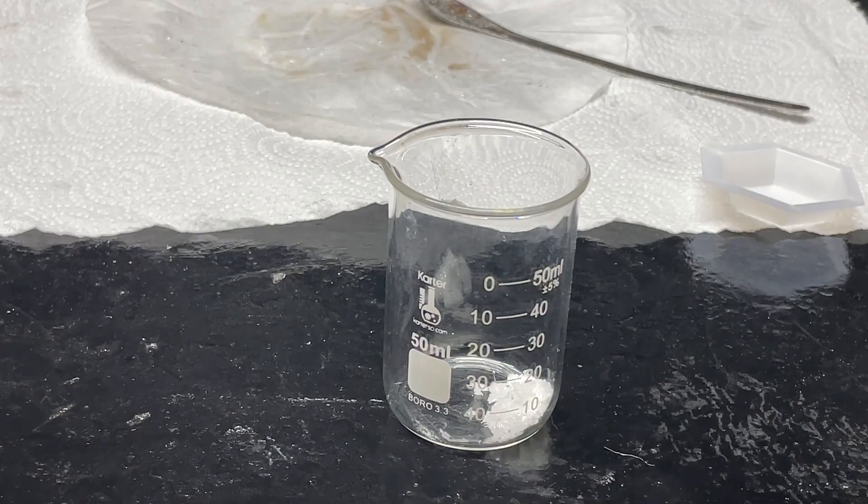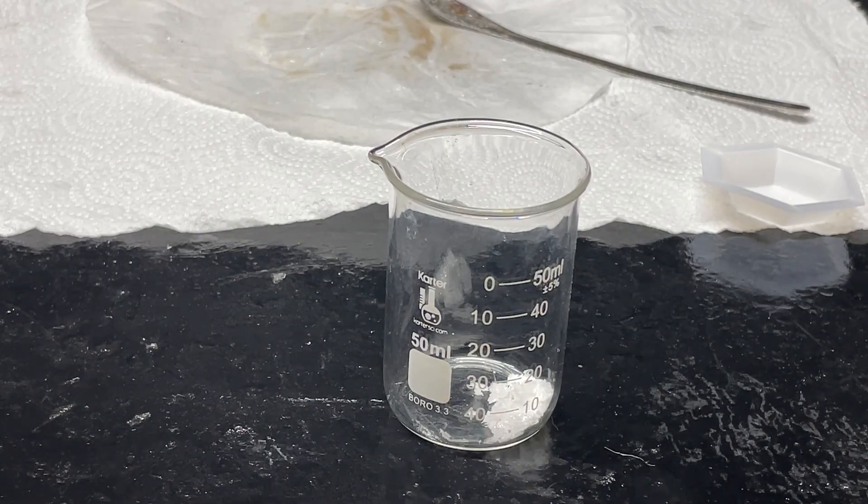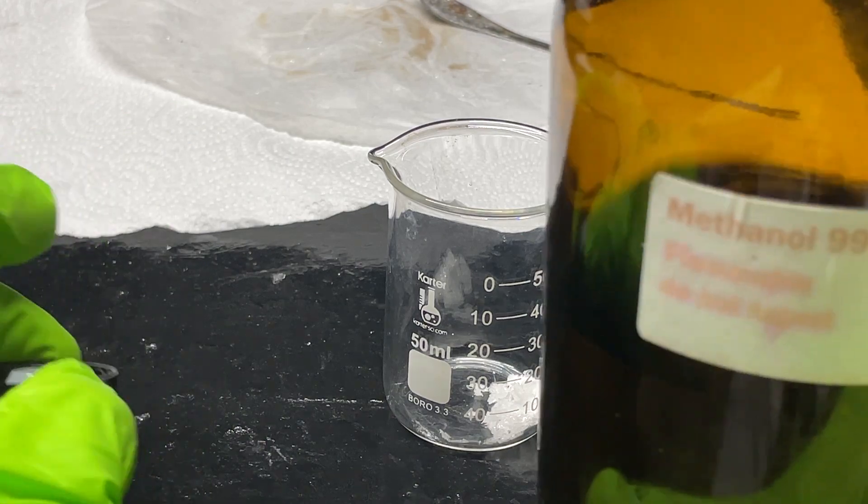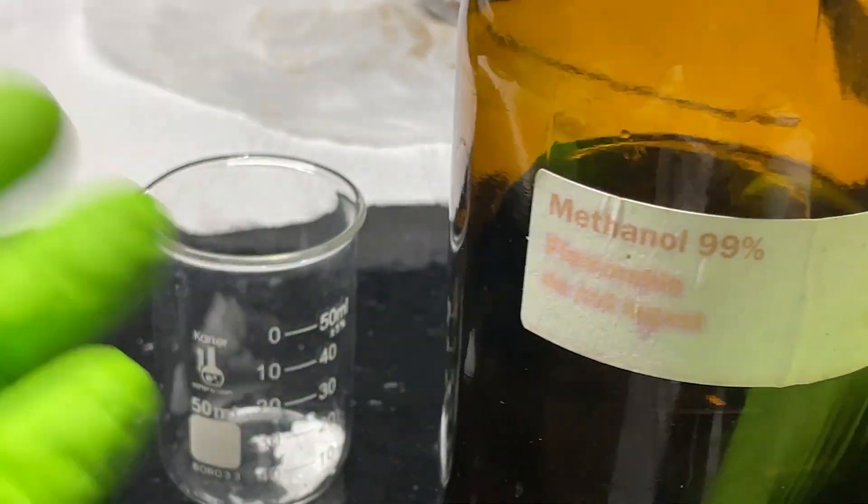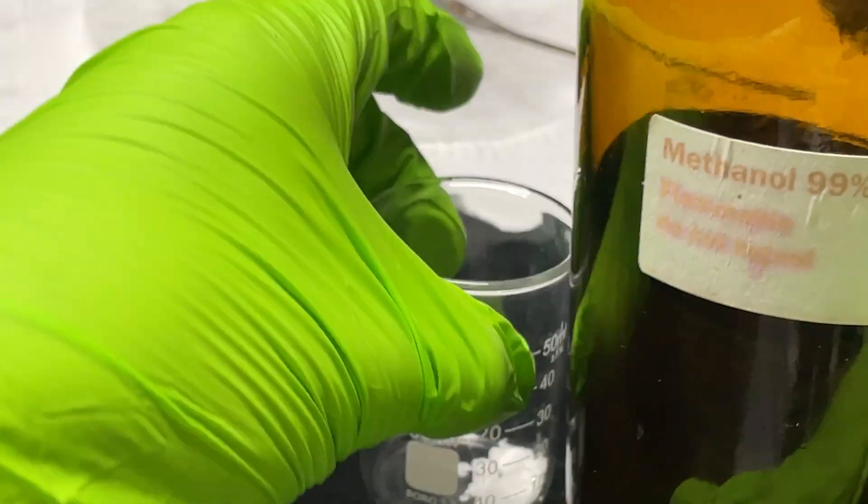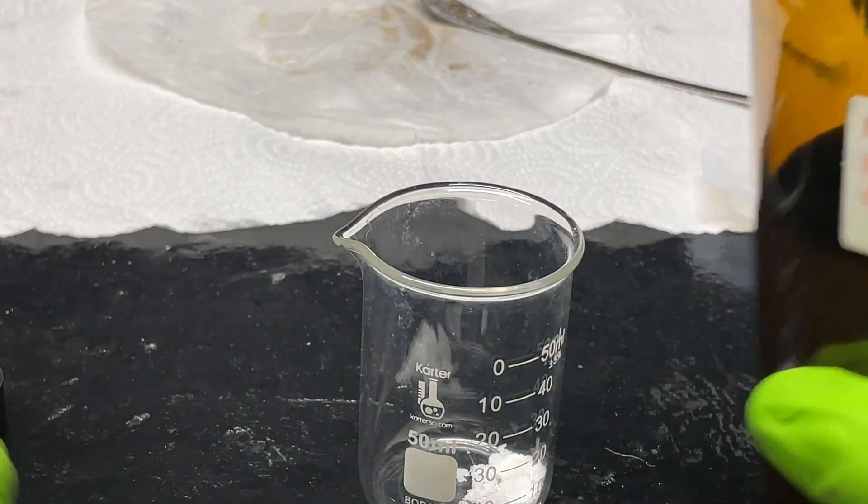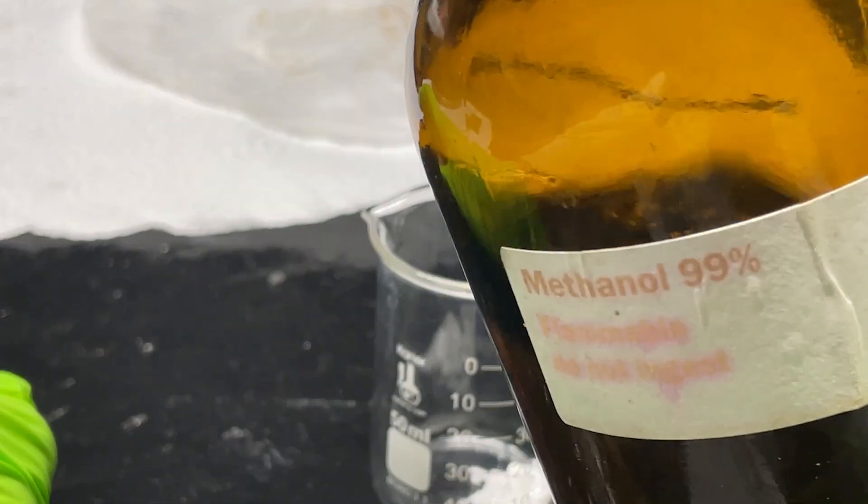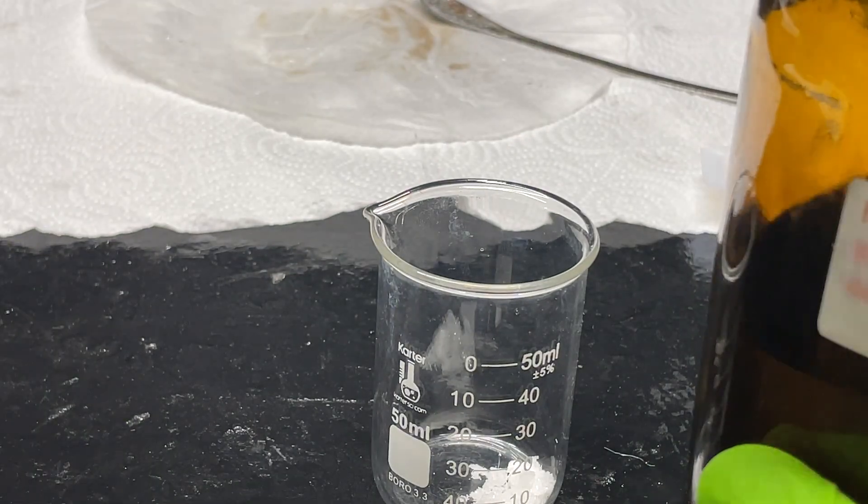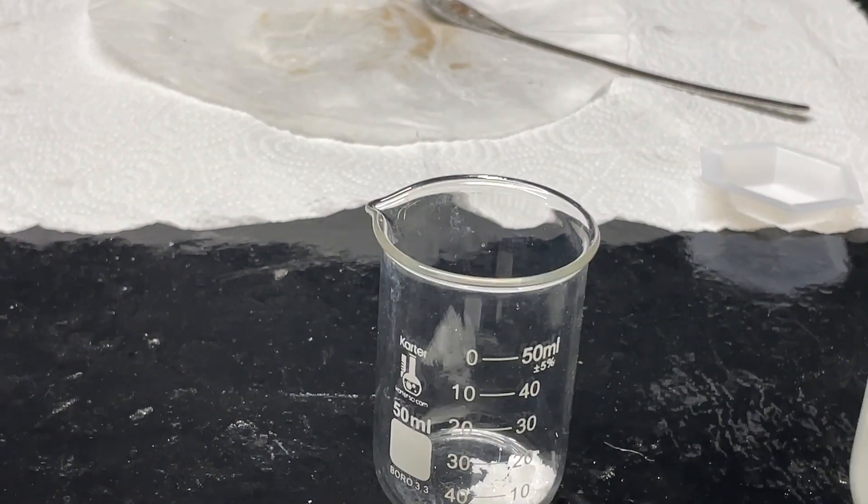Okay now we need to dissolve it in a solvent. So original mace used like a mixture of solvents including propylene glycol, t-butanol and some other stuff. I don't have all those so instead I'm just going to dissolve it in methanol, an organic solvent. This should work perfectly fine.